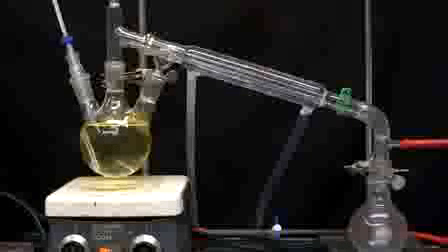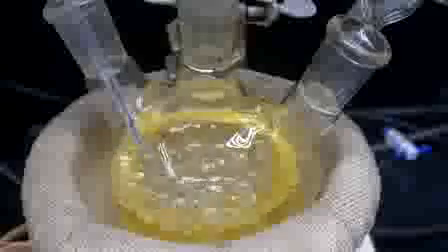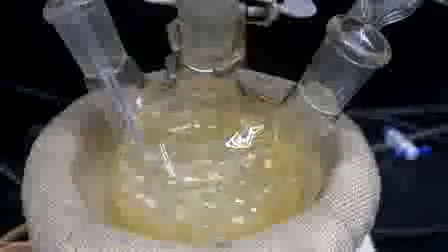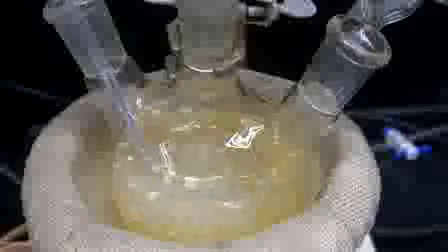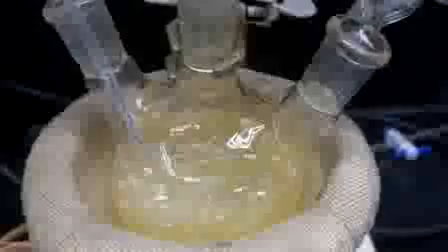The flask is attached to the distillation apparatus, and then we carry out a little more vacuum distillation. At this point, the height of the liquid in the flask is a little bit high and it makes me uncomfortable, so I was very careful at the beginning of the distillation. As the level decreased, I was a little bit more comfortable boiling it harder. Then eventually, just like before, ammonium chloride starts to precipitate out, so we turn off the vacuum, let it cool, and then filter off the ammonium chloride.